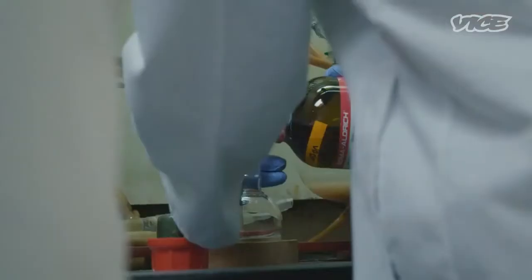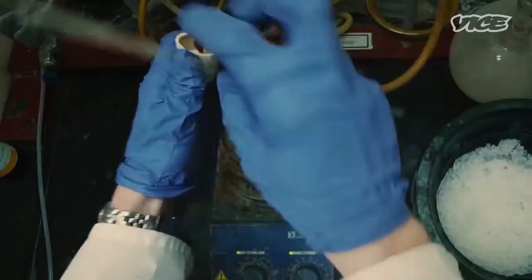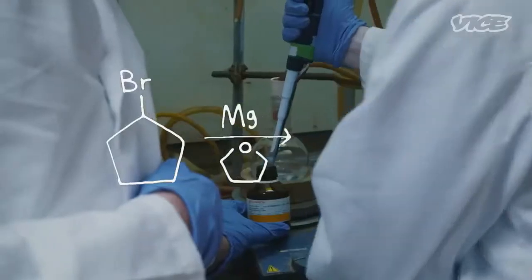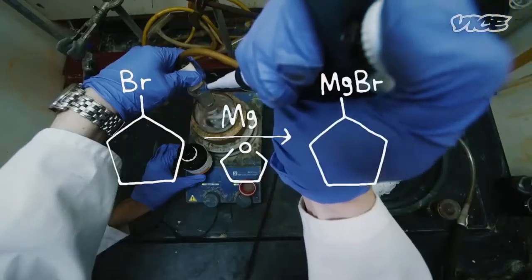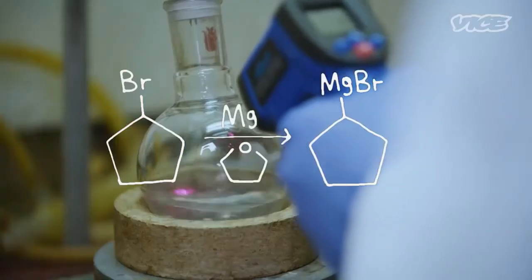Pulverized magnesium turnings are suspended in THF with iodine crystals. Bromocyclopentane is added dropwise, forming the Grignard reagent cyclopentyl magnesium bromide in an exothermic reaction. A great way of making carbon-carbon bonds.